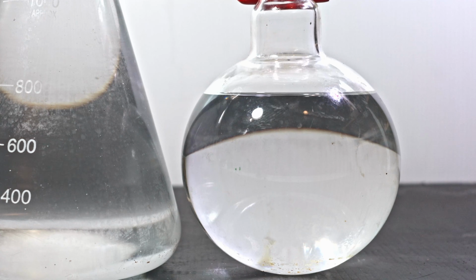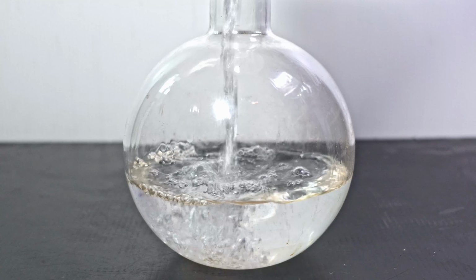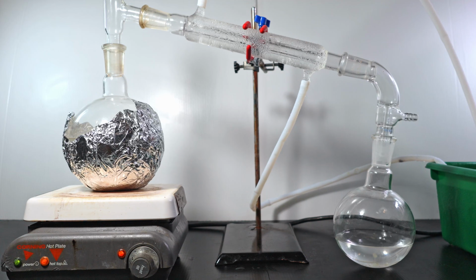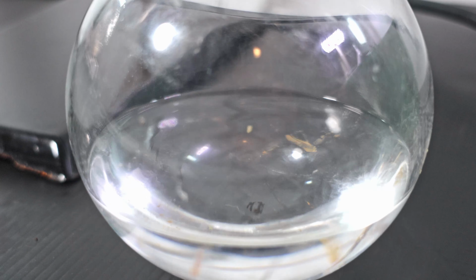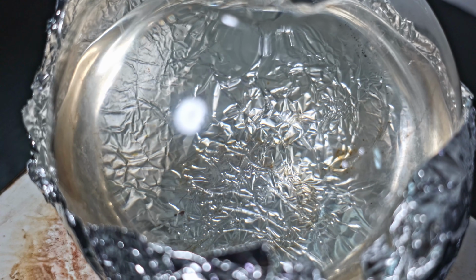Because my smaller flask had more nitromethane, I split up both portions. I pour out half my solution from the Erlenmeyer and half from the little flask. I do a soft distillation to boil off the methanol. The drip rate is slow, and while there is no visible boiling, methanol is being boiled.